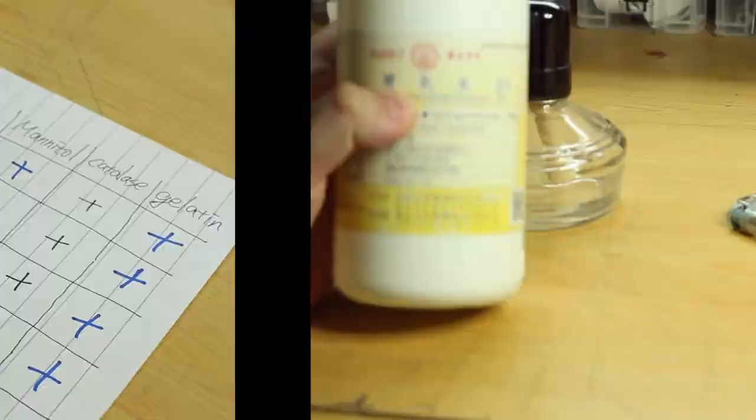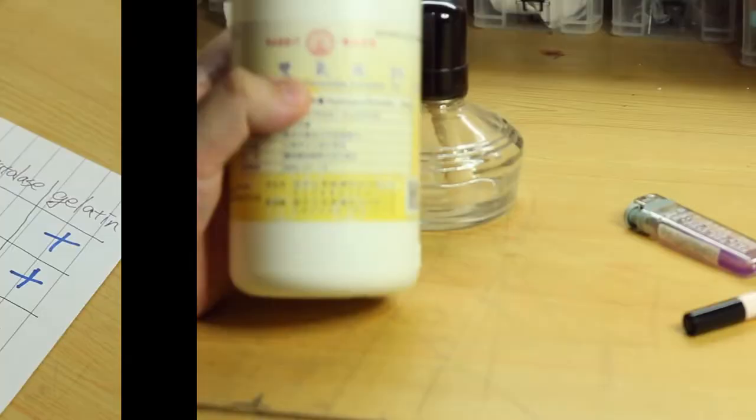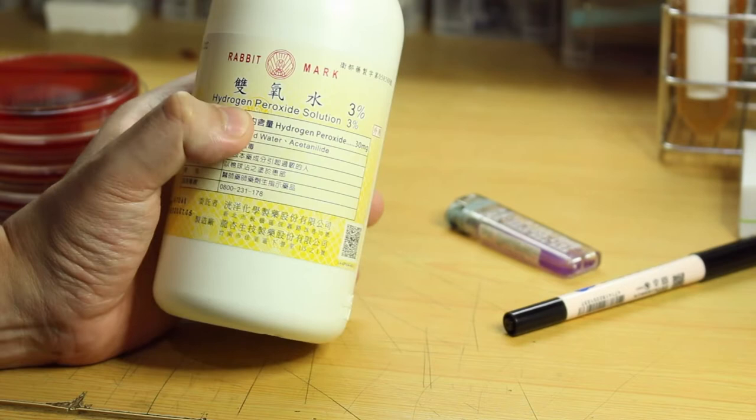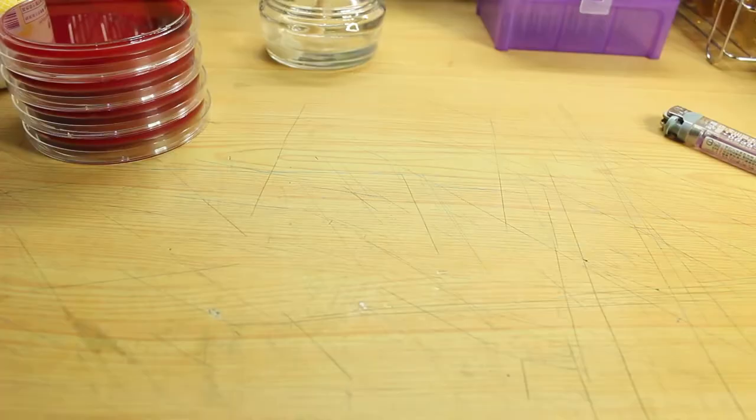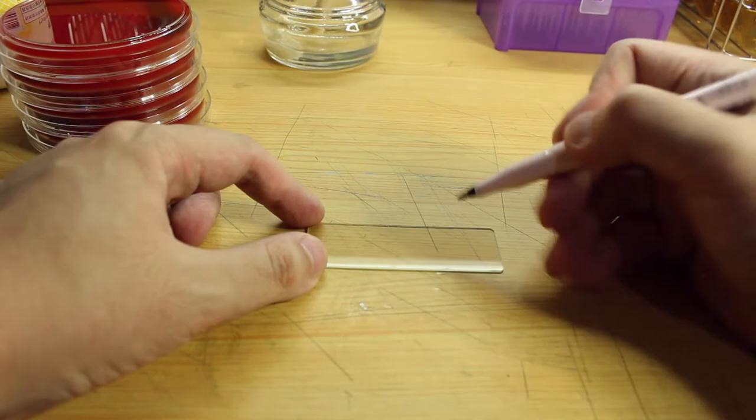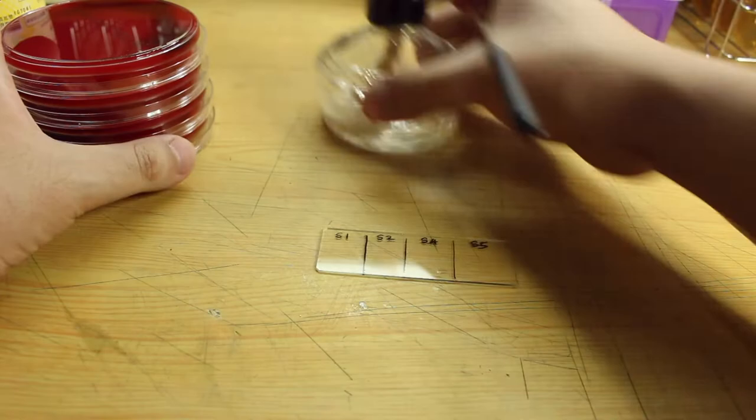The second test I'm going to do is called catalase test. Catalase is an enzyme that breaks down hydrogen peroxide into oxygen and water, which can help bacteria deal with this harmful chemical. To do this test, simply put some bacteria on a glass slide and drop hydrogen peroxide onto it. Bacteria that are catalase positive will generate bubbles instantly, while a negative one will not.